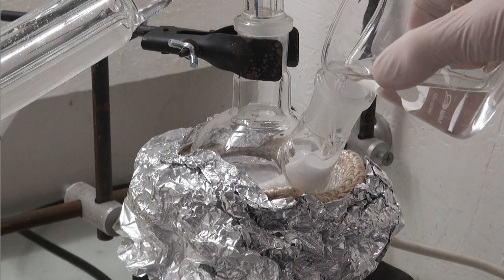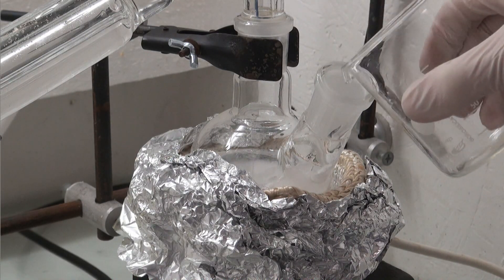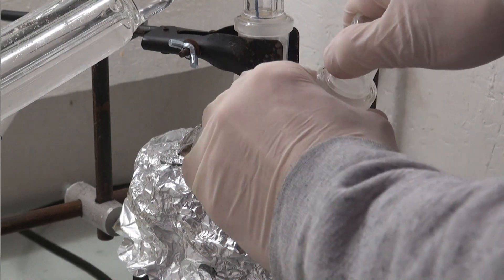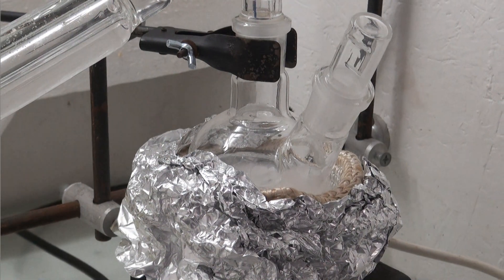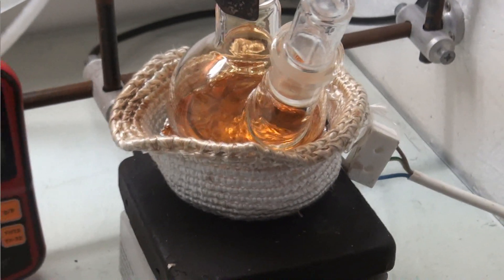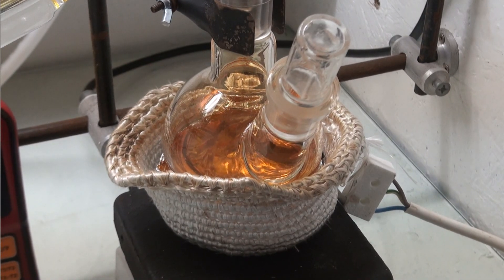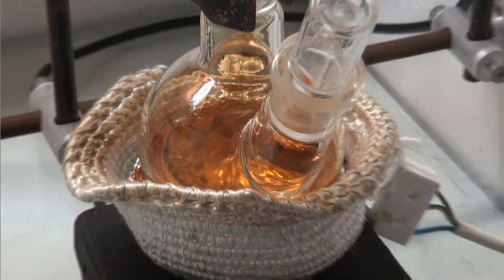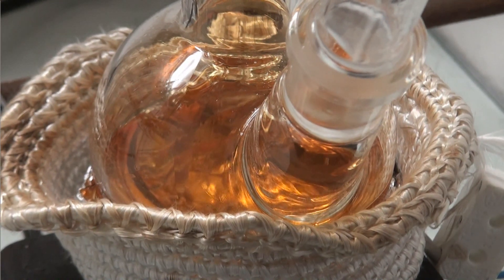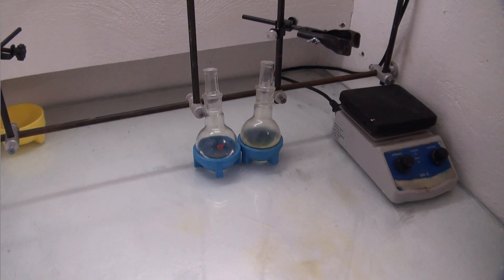Next, I set up a new distillation, this time with one mole of potassium nitrate and one mole of phosphoric acid. It behaved very similarly but produced more distillate that was slightly green too. Unlike the first one, at the end of this distillation, the stuff in the distilling flask was molten and only solidified after cooling.